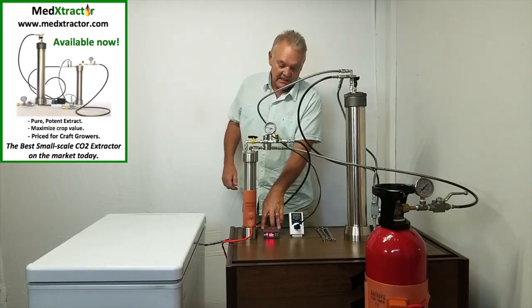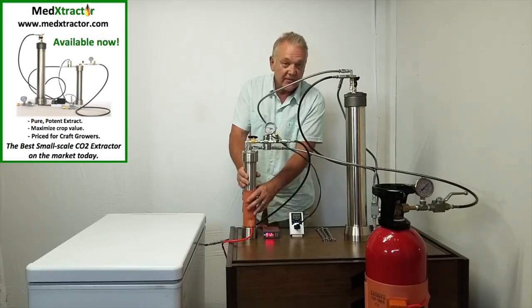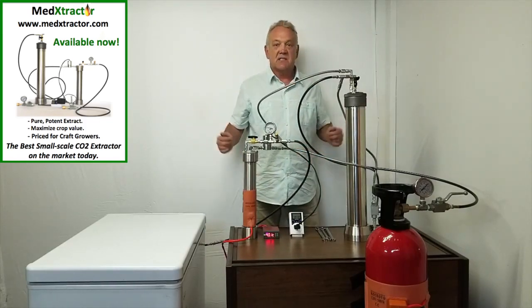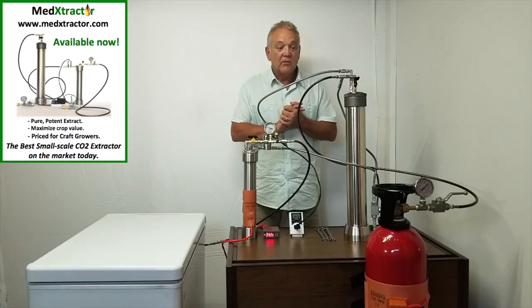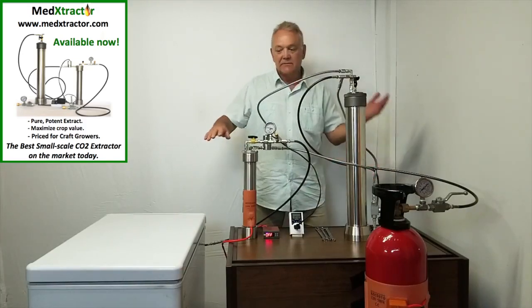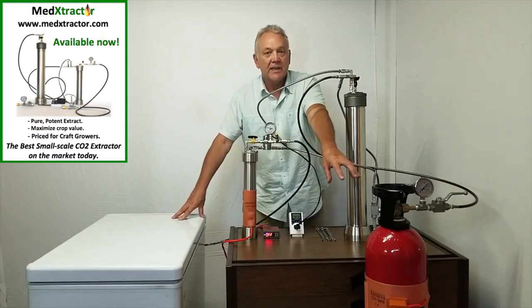The digital collector heater has automatically shut off. It's warm to the touch but certainly not hot. The timer has shut off and the system is sitting in stasis. Now what we want to do is swap the tanks. But before we swap the tanks, we want to take the residual CO2 that's in the supply tank and run it directly into the recapture tank, to make sure we've got a full load in the recapture tank and a fully depleted supply tank.